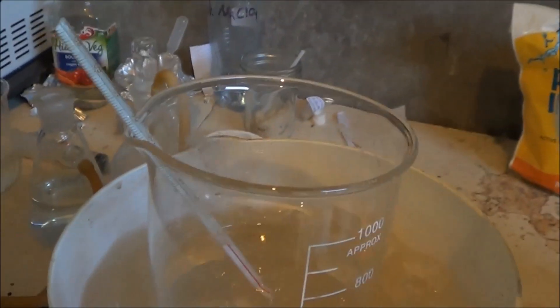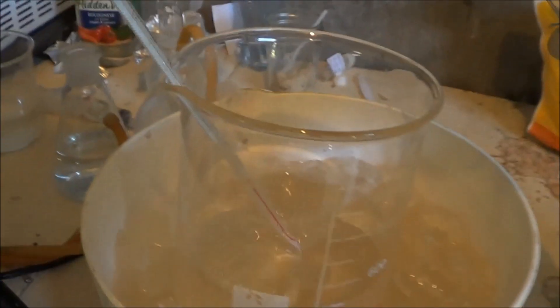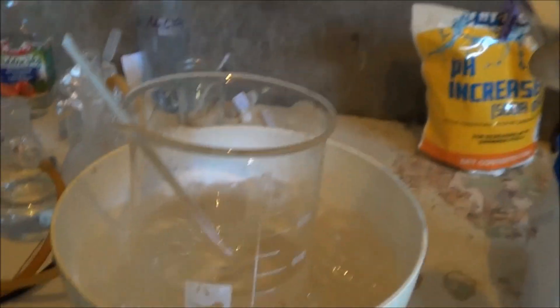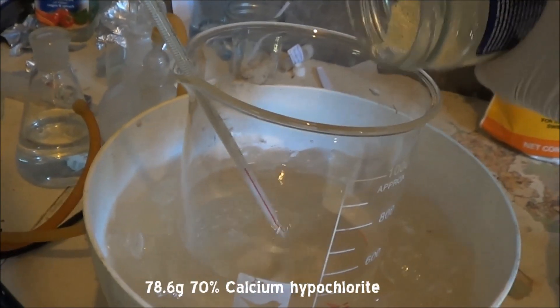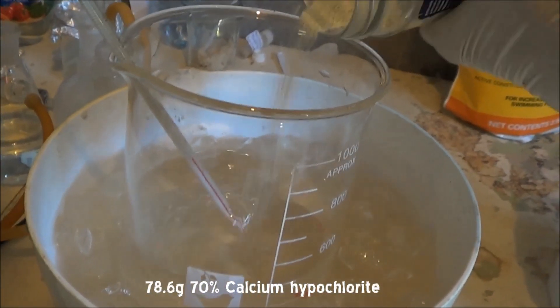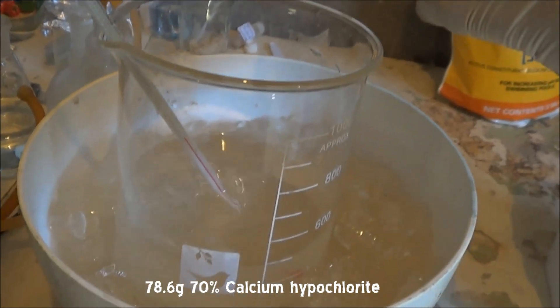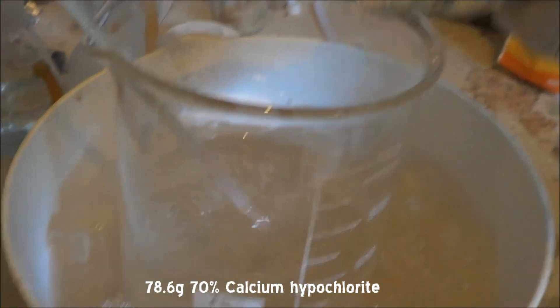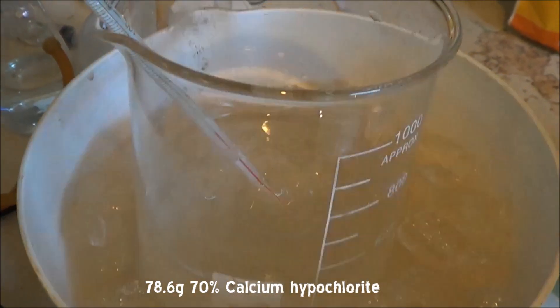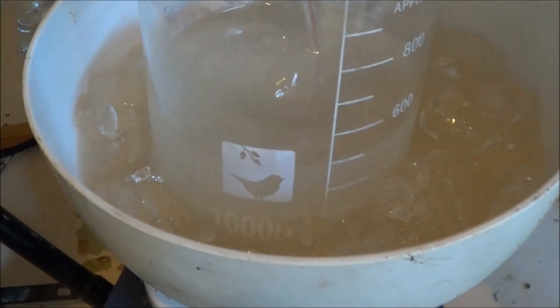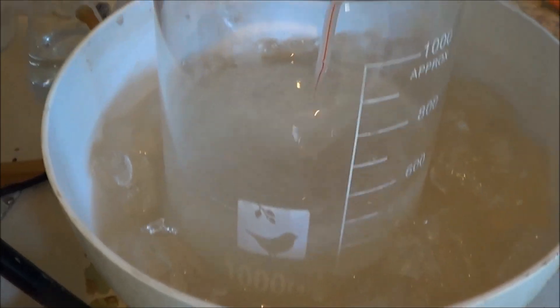Let's go ahead and add our calcium hypochlorite. Don't wear your best clothes while doing this because I have had a few junkers ruined by this because you're making very, very concentrated bleach. So, it's best to wear a lab coat or clothes you don't really like.